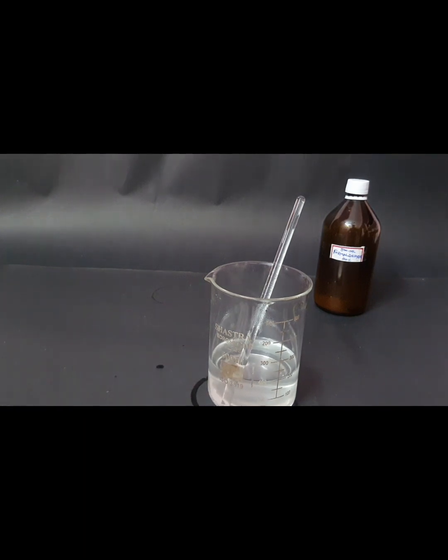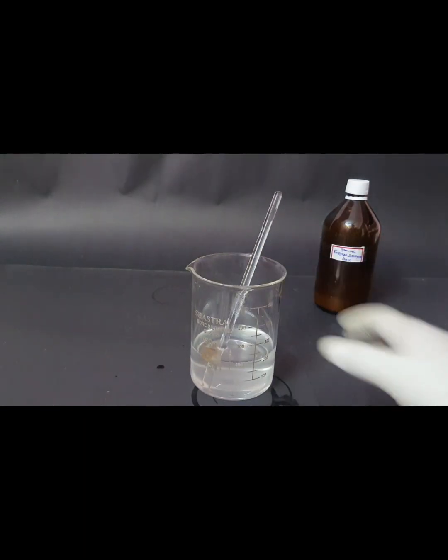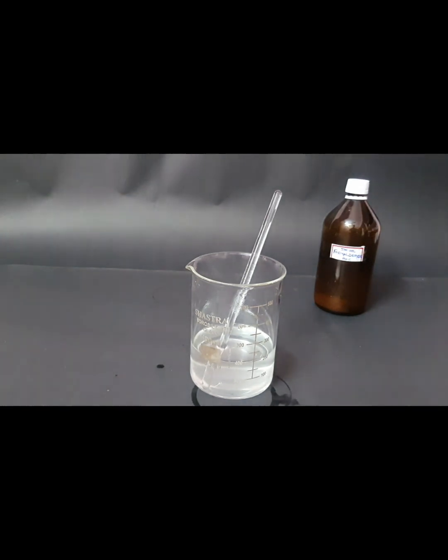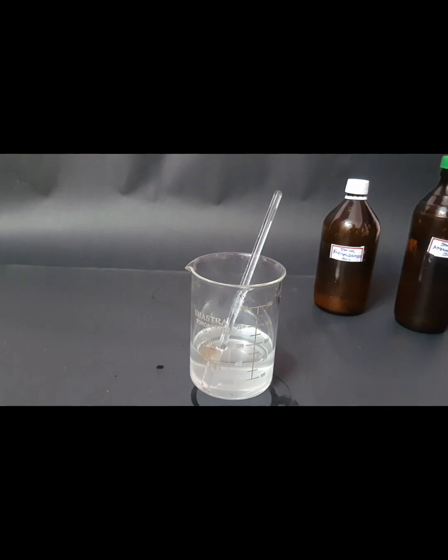What I recommend is that if you're making this on a large scale, it is perfectly alright to do it in a saucepan or a utensil made of metal, because ammonia and formaldehyde do not react with metals, and I am sure that it can be done with metals, but in our case we are not doing that, as that would be for synthesizing secondary explosives.